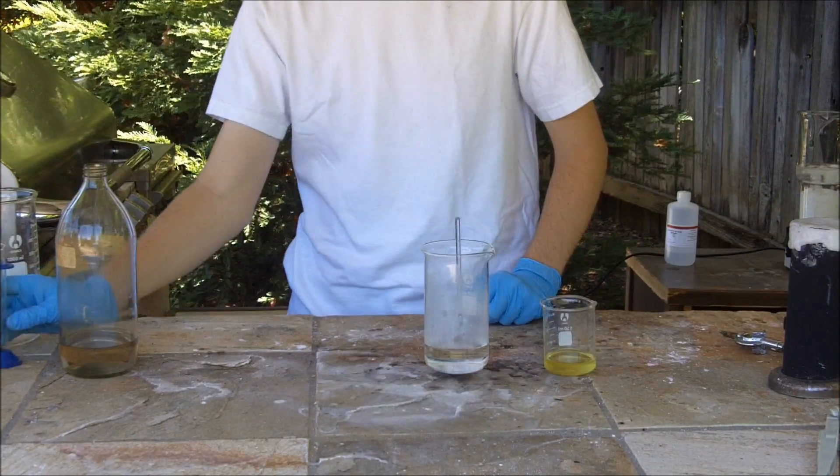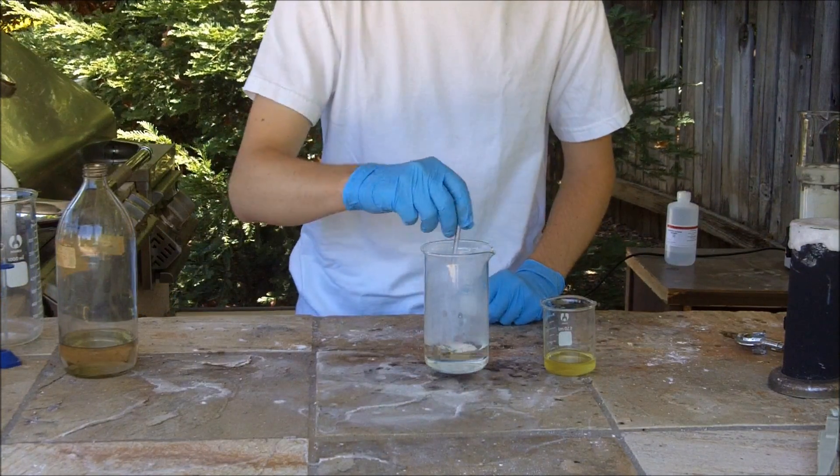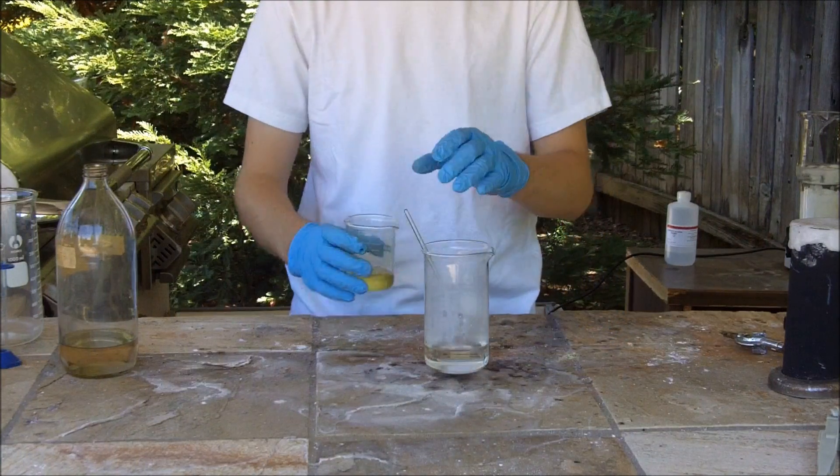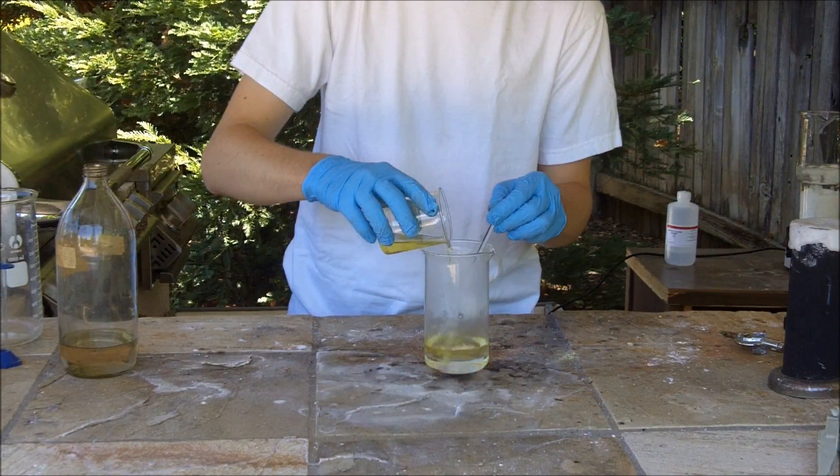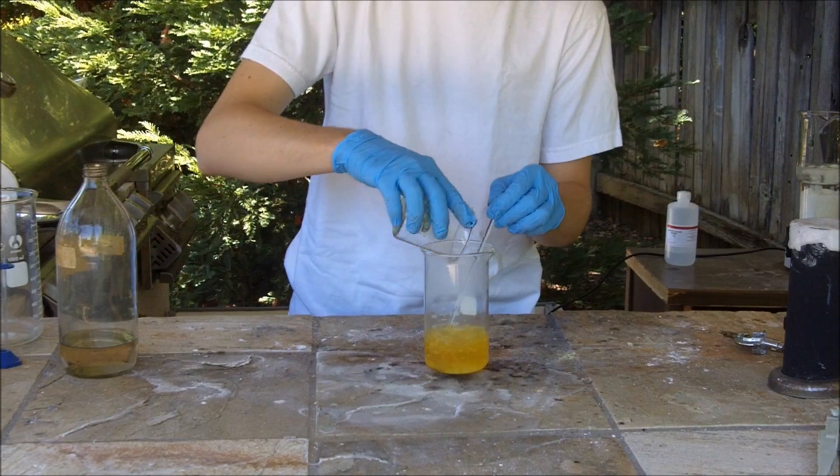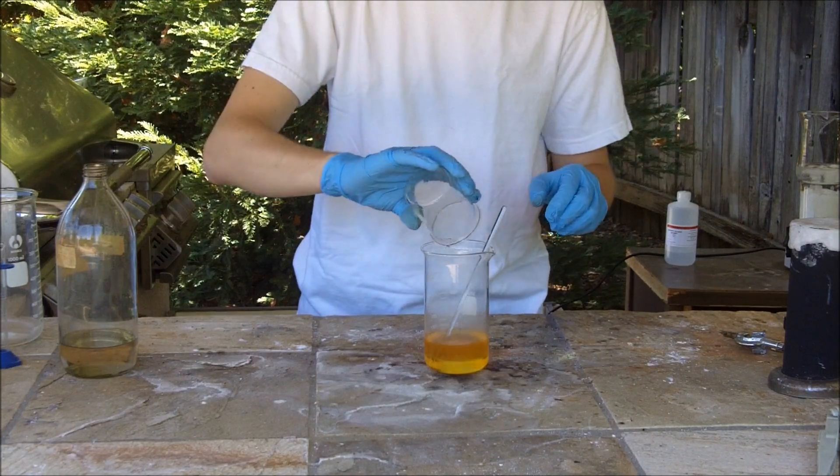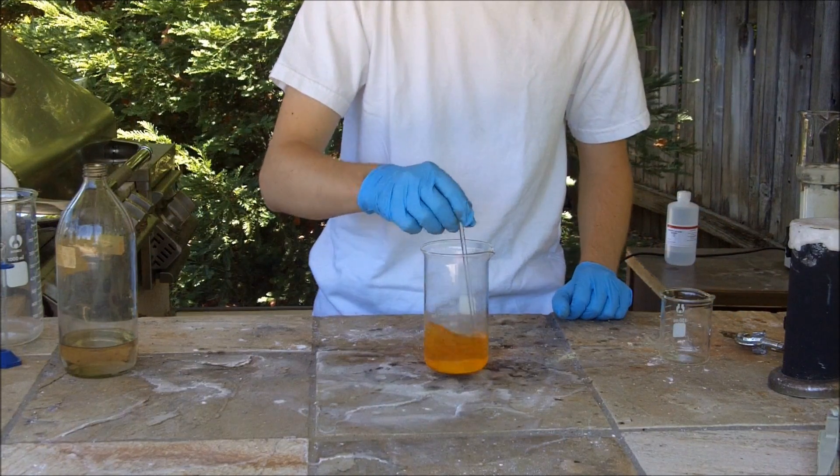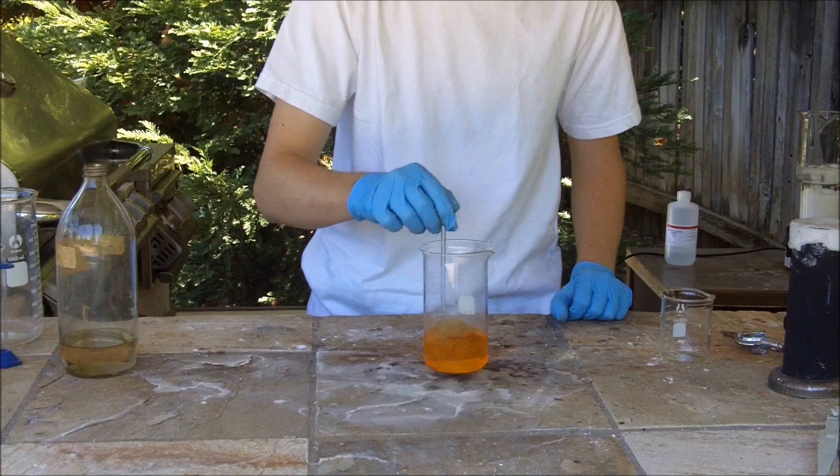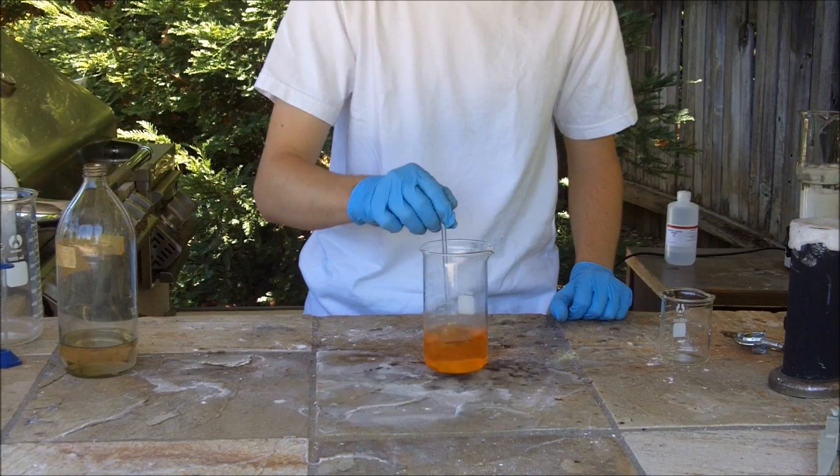All right, now while this sulfuric acid solution is still very hot, pour the methyl ethyl ketazine directly into it. What we are doing is hydrolyzing it to methyl ethyl ketone and to hydrazine sulfate.